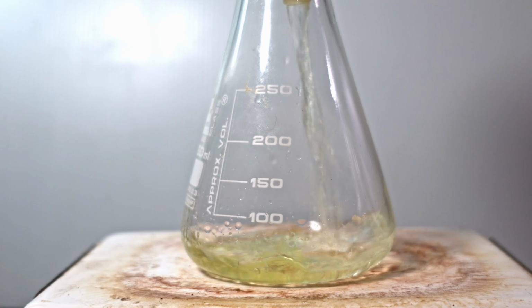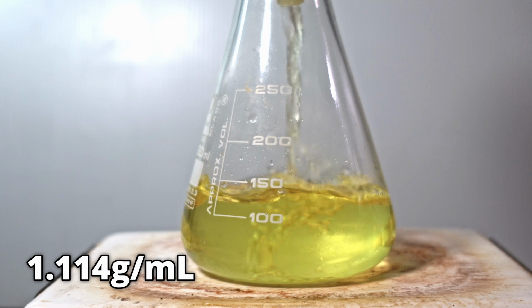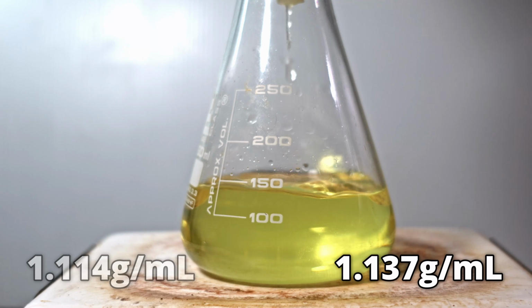Later, the nitromethane turns yellow and stops boiling entirely. This is how I know I have pure, or at least nearly pure, nitromethane. I pour this out into a small Erlenmeyer. The density is 1.114, pretty close to the reported density of 1.137.